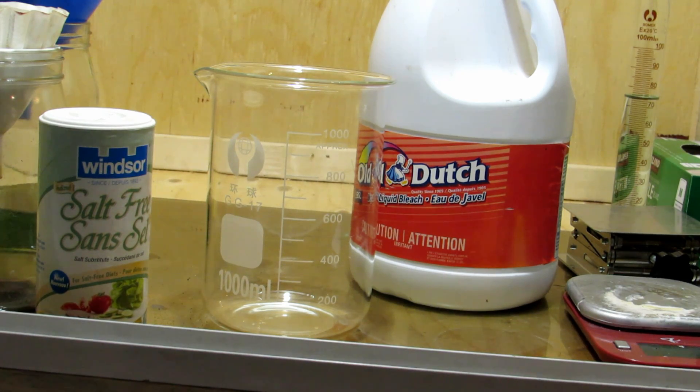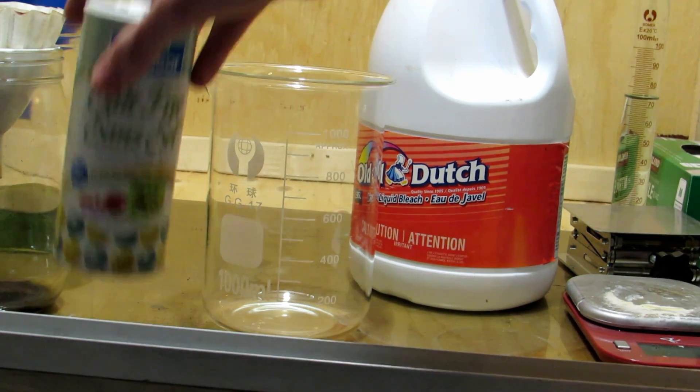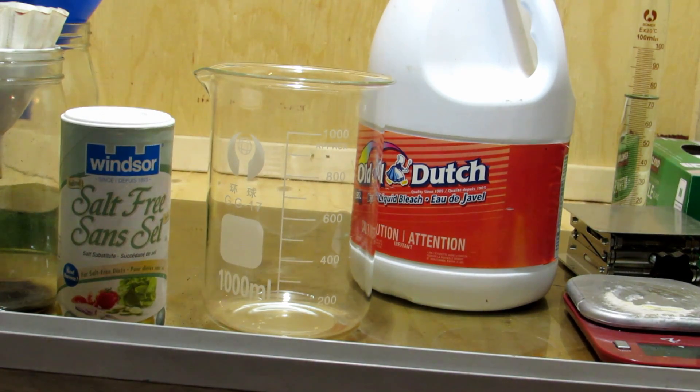So instead, today we're actually going to be making it from bleach. Typical bleach contains calcium hypochlorite or sodium hypochlorite. By boiling it down, we can turn it into calcium or sodium chlorate. By doing a double displacement reaction with potassium chloride, you can actually form potassium chlorate.